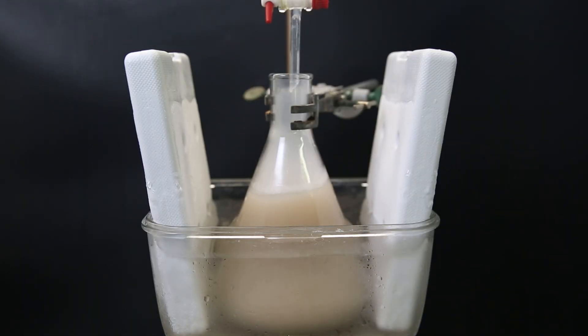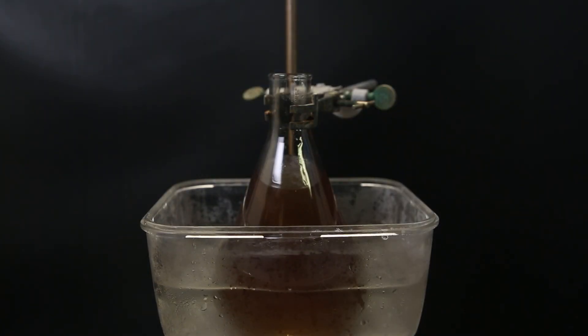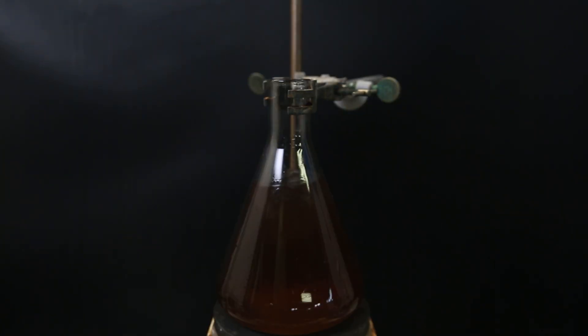When the addition of triethylamine was finished, the mixture looked pretty much the same, but after a short while, it turned transparent. To make sure the reaction is finished, I move it out of the ice bath and let it stir at room temperature for 5 hours.